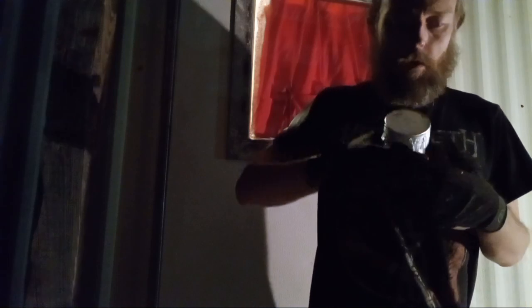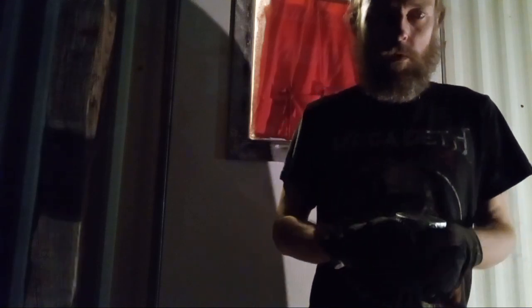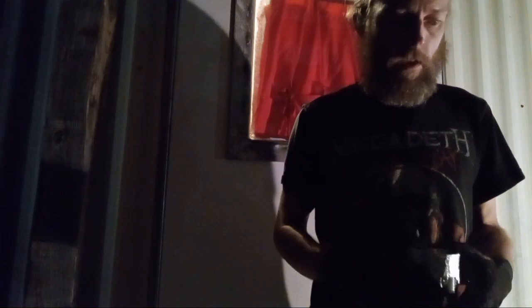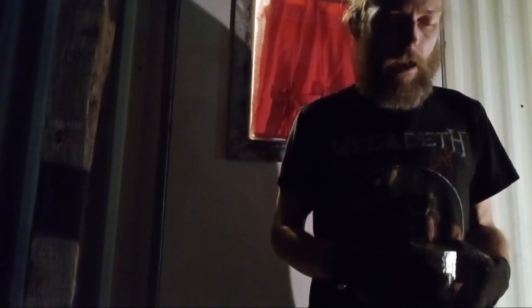So, all right. Yeah, so let's get to it. We're going to use a $15 Walmart hot plate, some aluminum foil to help capture the heat. We have a foil cap on this with some little pinholes in it, and that'll help the ammonia leave, help control the foaming if it gets up a little too high, and it keeps water out, which can interfere with the reaction. All right, let's get to it.